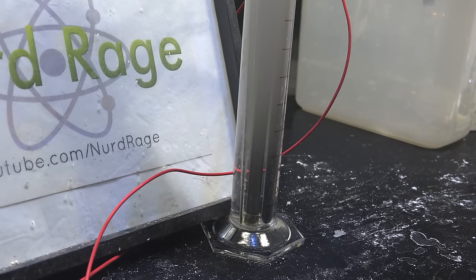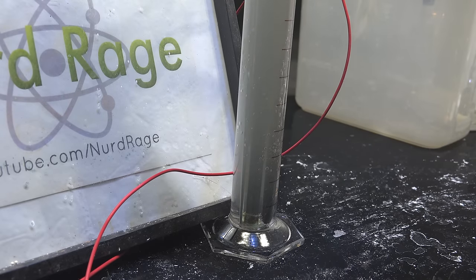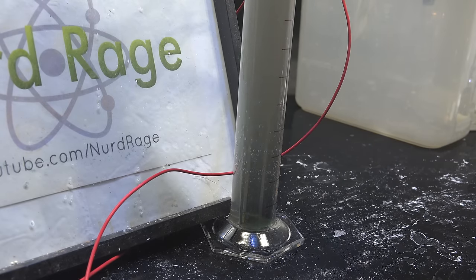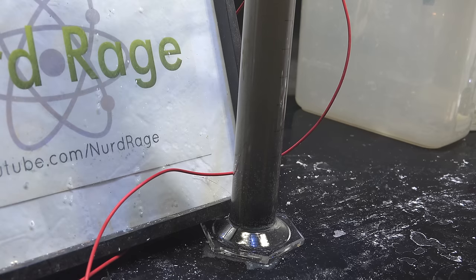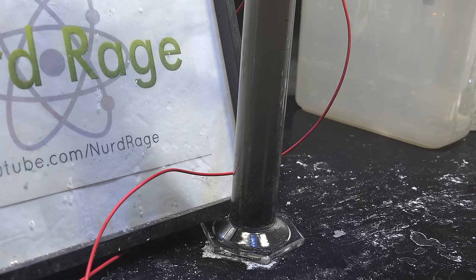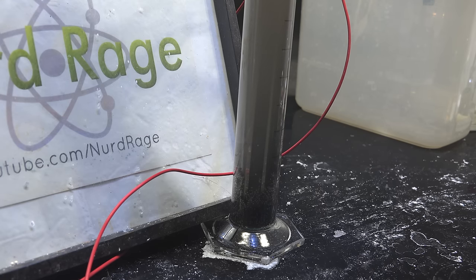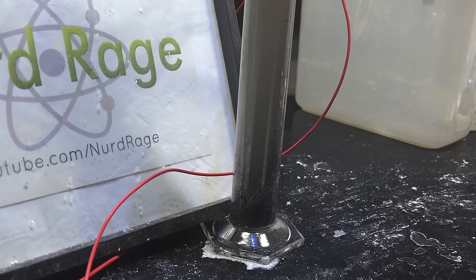It's making potassium chlorate but you can see carbon particles slough off the carbon electrode and contaminate the solution. This will contaminate your potassium chlorate. Another drawback is that carbon electrodes don't take high current as well as the other electrodes I have. They can safely handle about 30-40mA per square centimeter of submerged surface area. If you go higher they corrode exceptionally fast. So to get a high production rate you need lots of carbon electrodes or use very large ones.